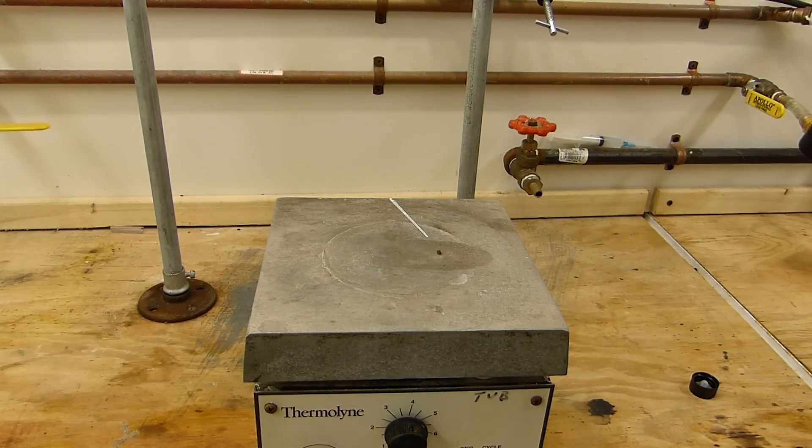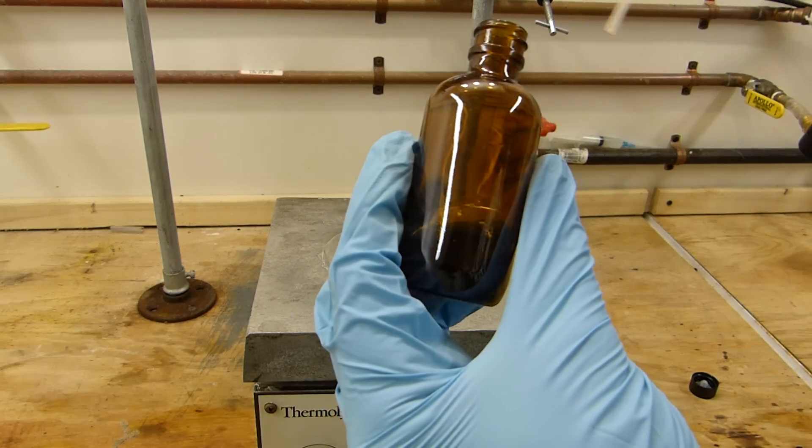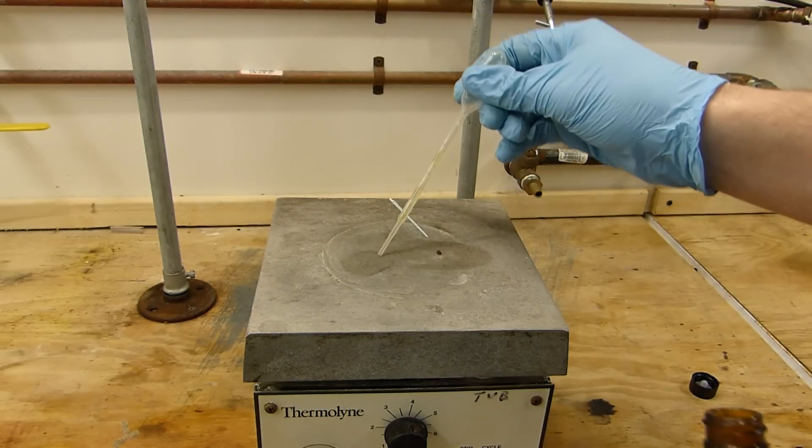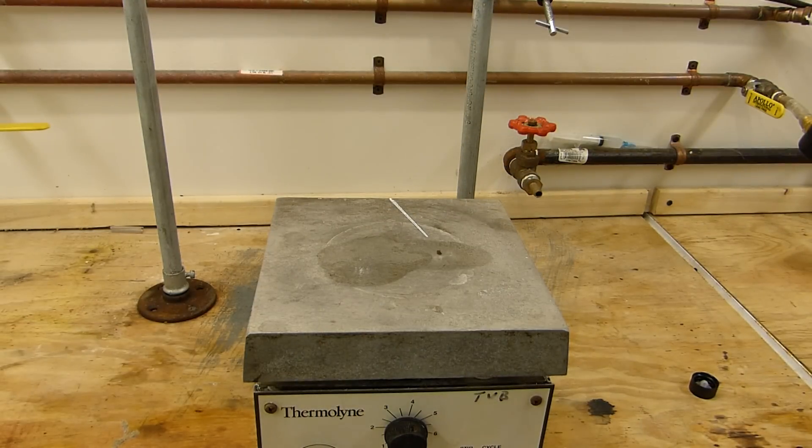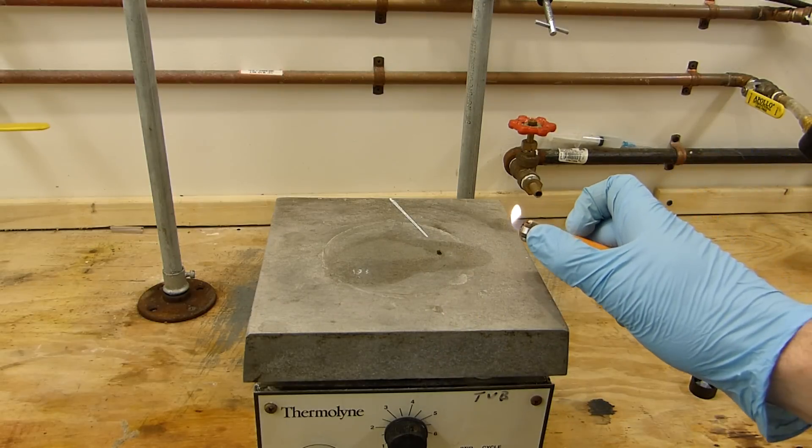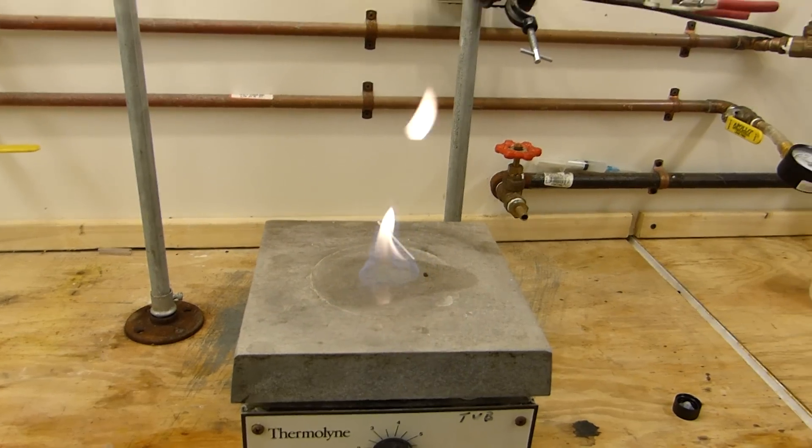Another property of isopropyl nitrite is that it is extremely flammable. This reaction needs to be carried out far away from all flame and spark ignition sources. You'll see what I mean here. I've got a little vessel of isopropyl nitrite here and a pipette. And I'll suck up a little bit and spread it on this hot plate. I'll then take my lighter and just bring it close. And you can see how far the vapors had traveled already. It burns with a nice luminous flame.